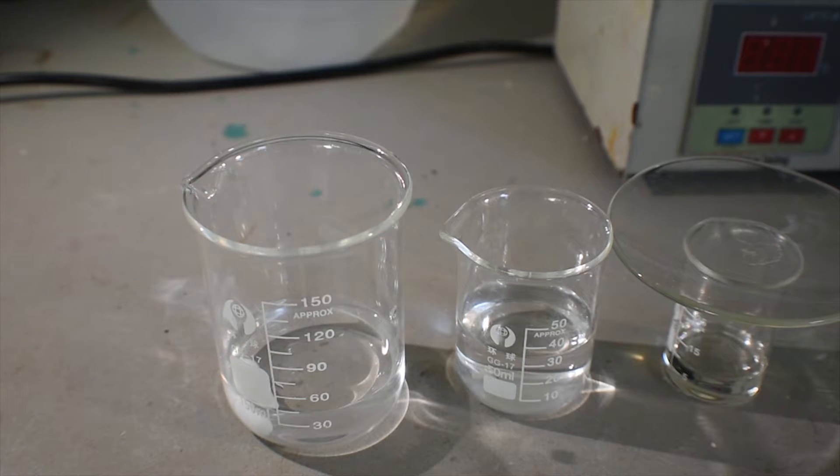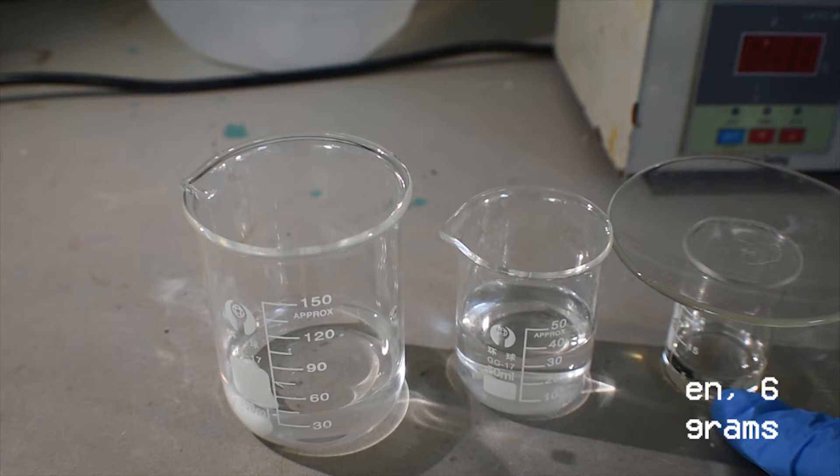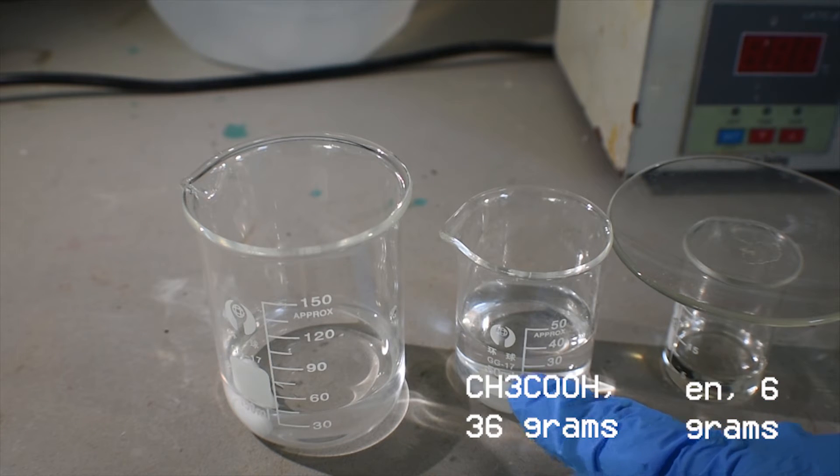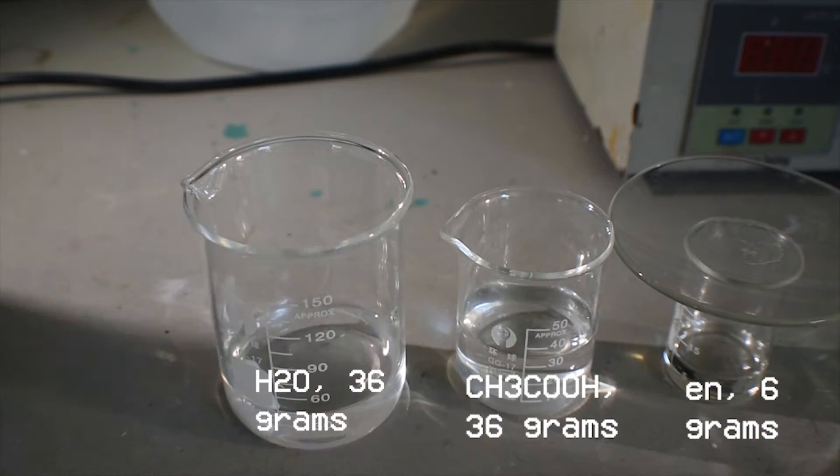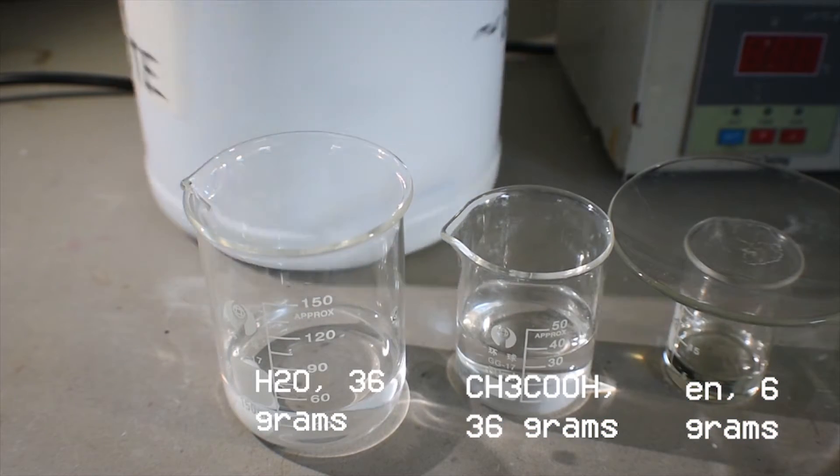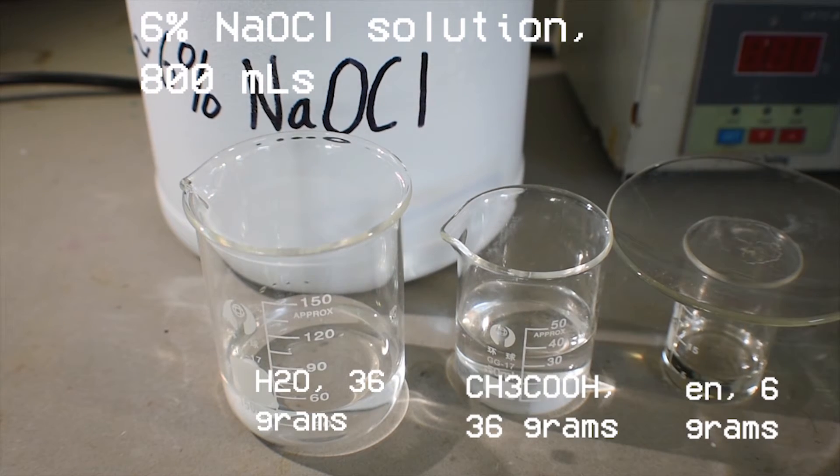So starting from right to left, we have six grams of ethylene diamine, 36 grams of glacial acetic acid, another 36 grams of distilled water, and you'll also need about 800 milliliters of 6% sodium hypochlorite. So, let's get to the process, shall we?